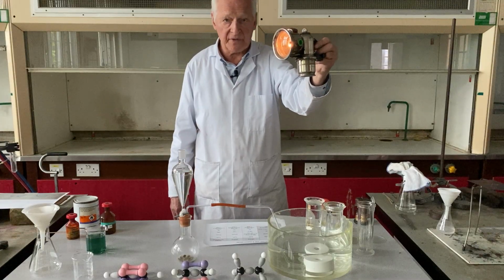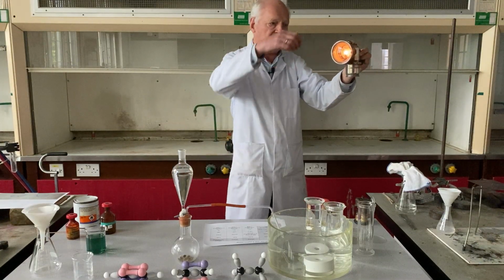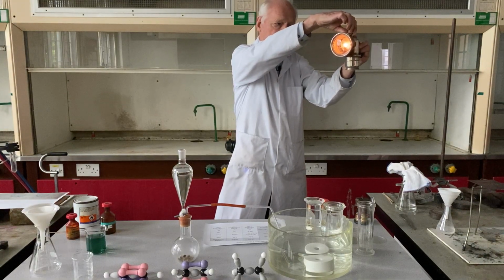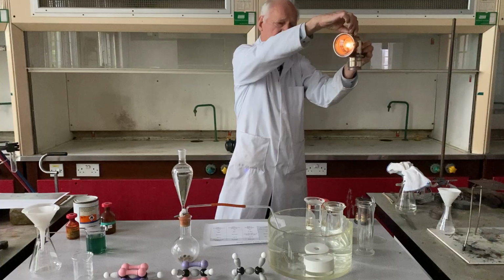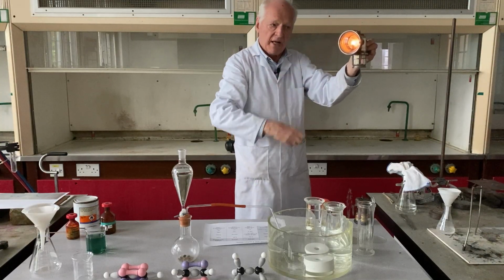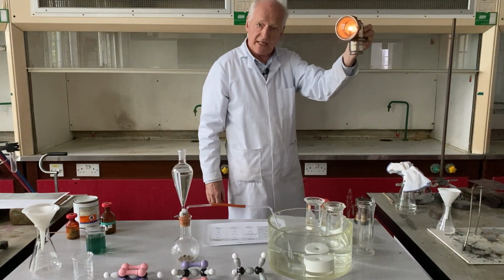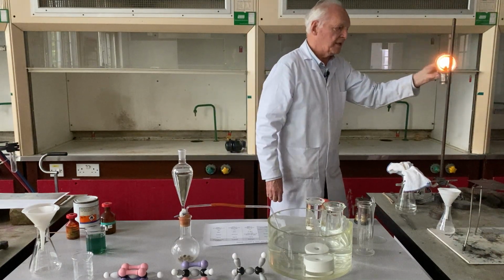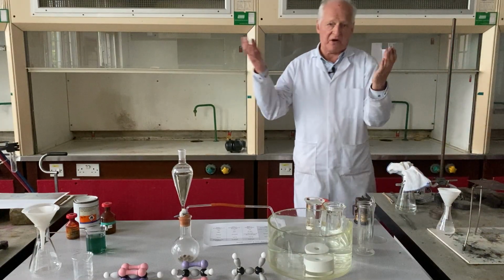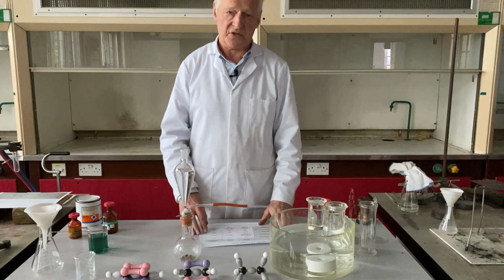So we'll put down our lamp now very carefully, and I shall extinguish the flame by turning the knob at the top. What this is, is a fine jet. It's what we call a tapered needle, and it extinguishes the flame by removing the supply of water. As I said, later I will come to explain the details of this when we start on our experiments with acetylene. So, what is acetylene?